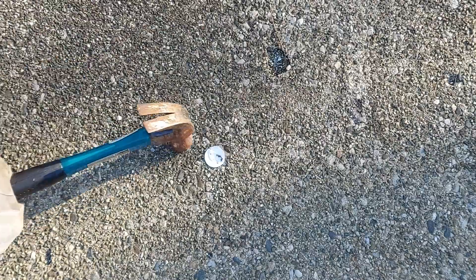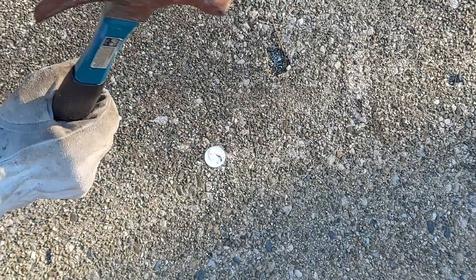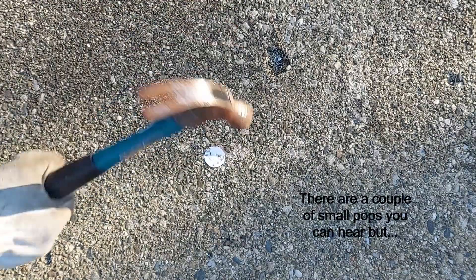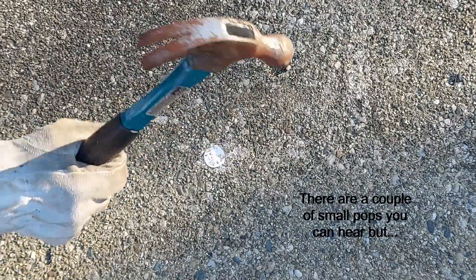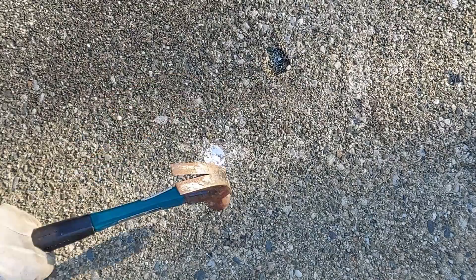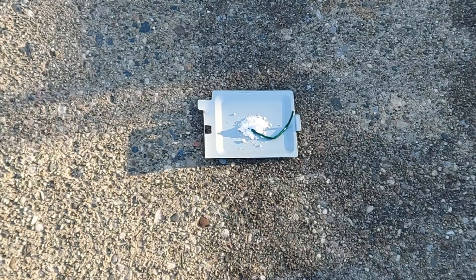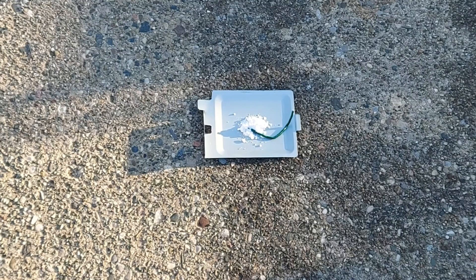All right, let's take it outside and see if we can't get this thing to go off with a hammer. Smash this sticker with the HDP in it. I'd say that's a negative test. That's just over a half a gram there out in the open and just lighting the fuse.